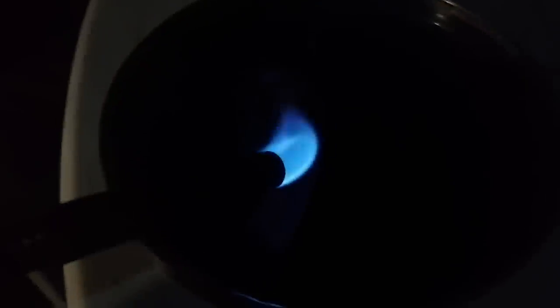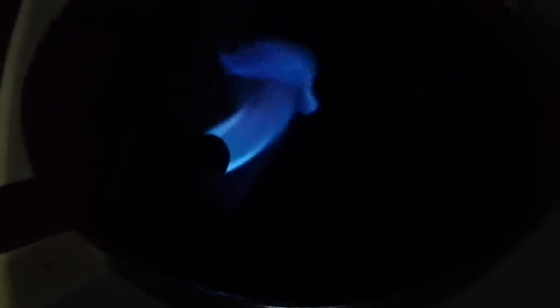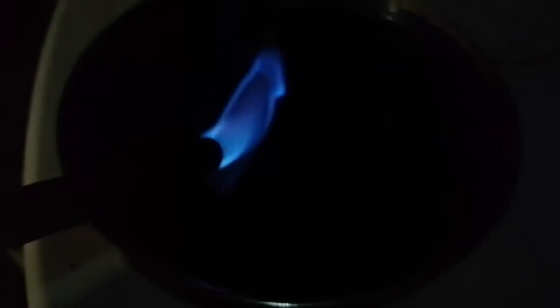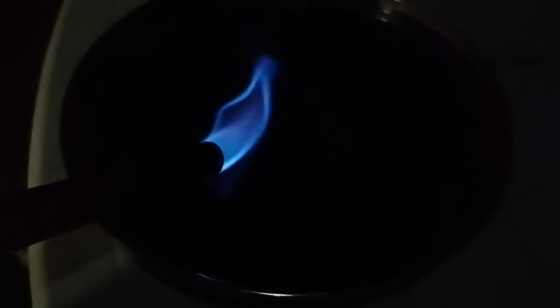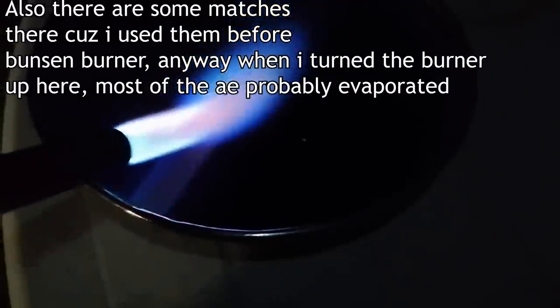Here's me pipetting some of the distillate onto a pan and lighting it with a Bunsen burner. When watching the footage after recording I was pretty excited — you can see in slow-mo a little bit of flame starting to travel to the right, which I think means something ignited for a little bit. But it's not something that ignites easily, since it has a boiling point of 140°C. Something does seem to be slowing down the acetic anhydride, which could be organo-sulfur compounds or just acetic acid, but I prefer not to believe that.